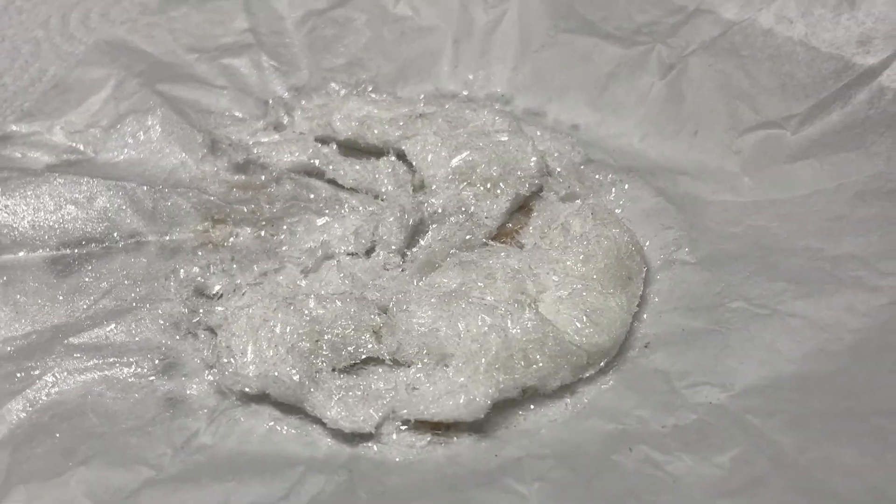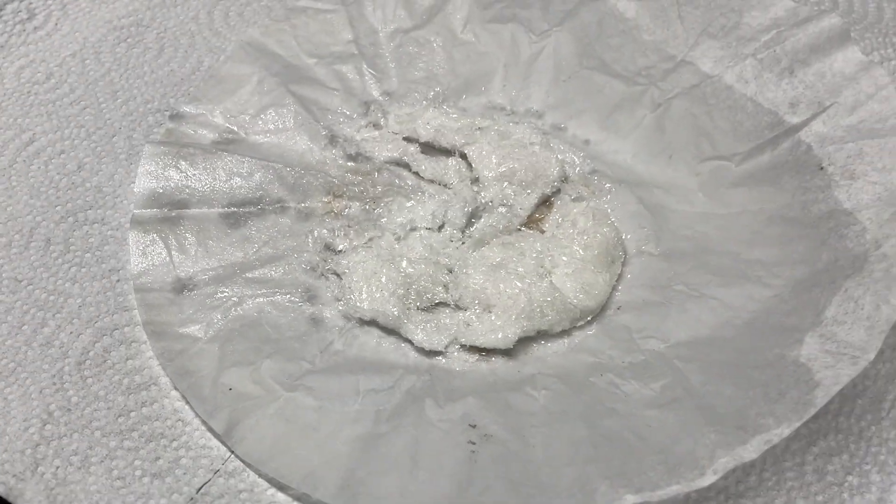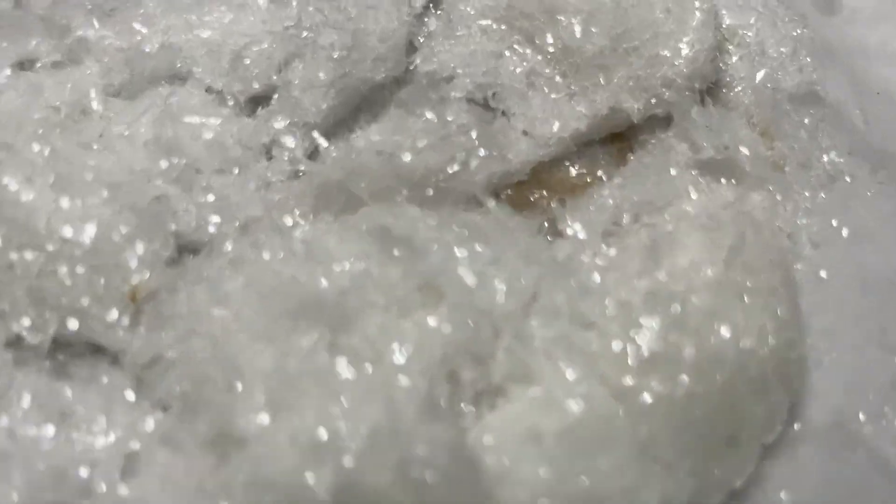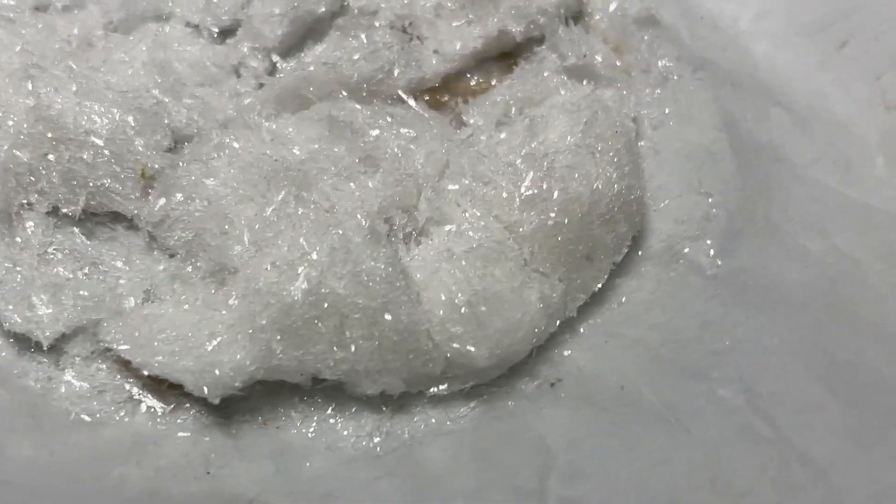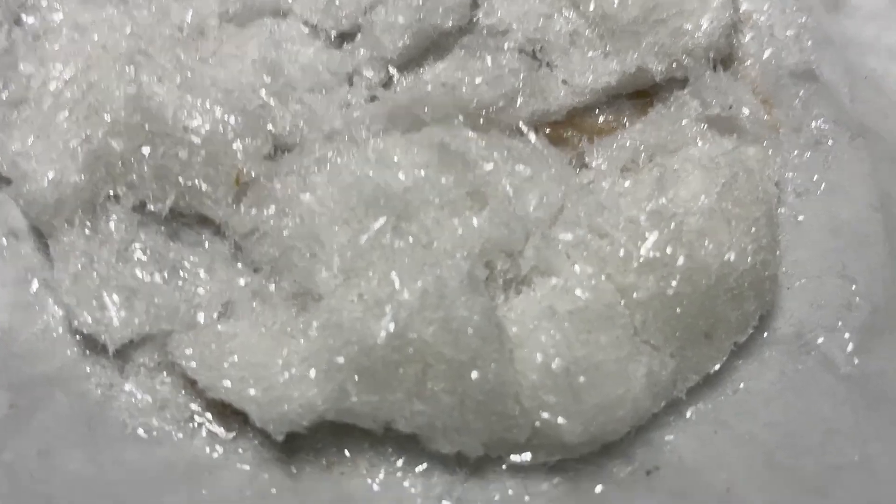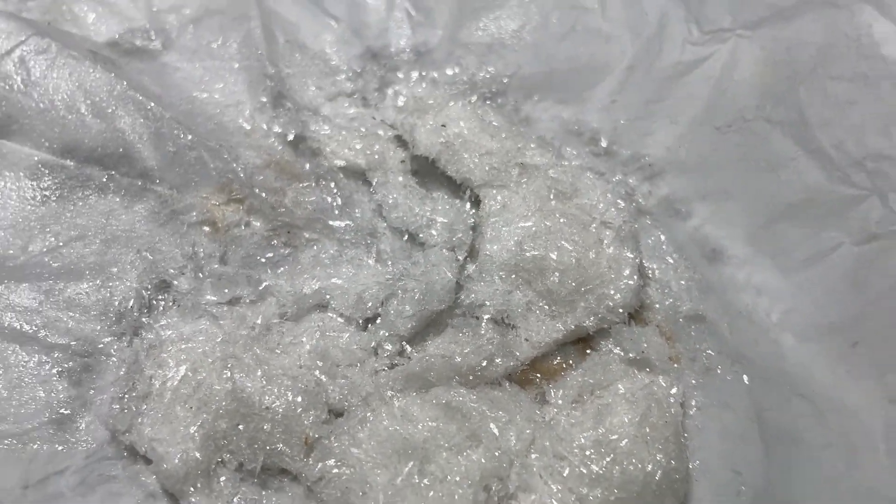Here's our active ingredient in mace, our chloroacetophenone. Let me get some action shots of it. Man those are some nice looking crystals - nice but god did they cause pain.